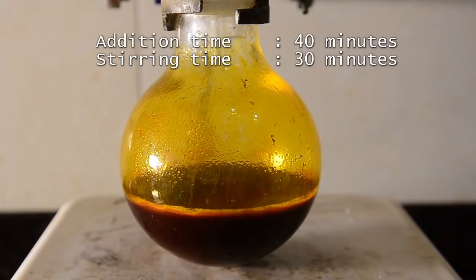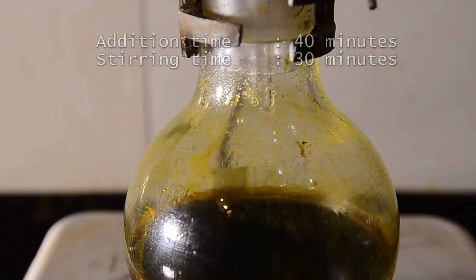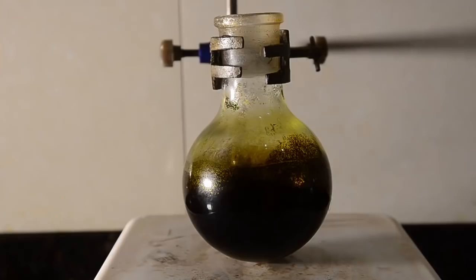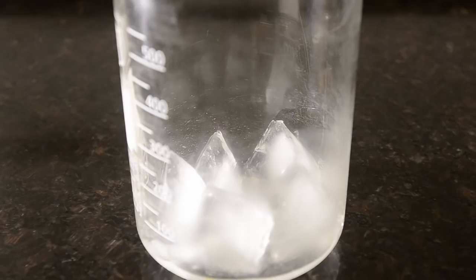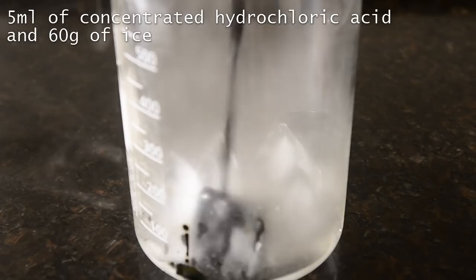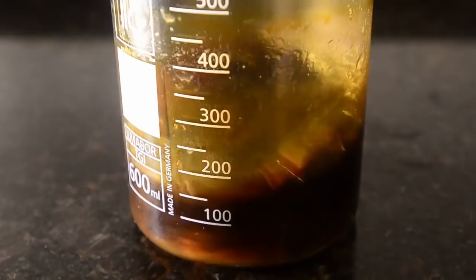During this period you can dismantle and carefully wash the addition funnel using the allotted sodium hydroxide solution. After 30 minutes of stirring, take the solution and carefully add it to 60 grams of ice and 5 ml of concentrated hydrochloric acid in a large beaker. Then stir the mixture well and allow to settle.